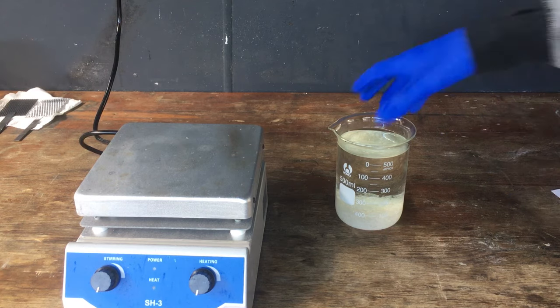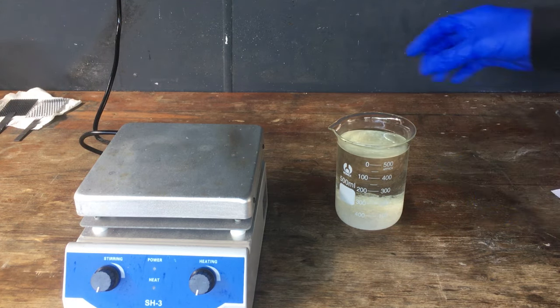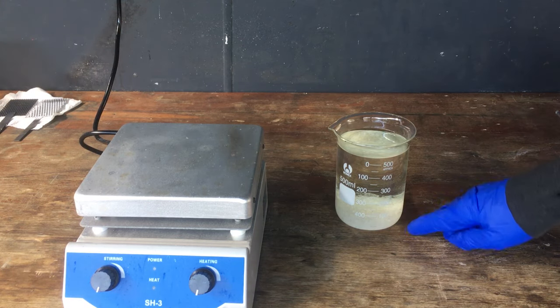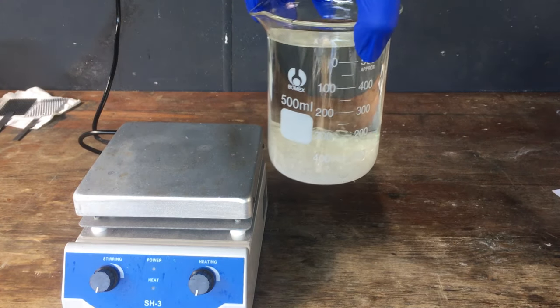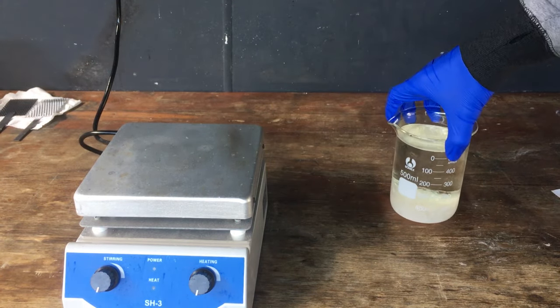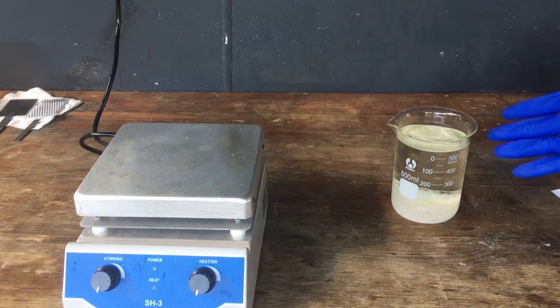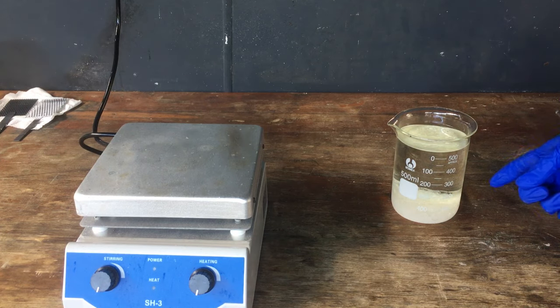Now after finishing running the cell, we are left with approximately 550 milliliters total of very concentrated sodium chlorate solution. In fact, as you can see down the bottom here, a whole bunch of sodium chlorate has crystallized out, which is very promising. Now we could probably just extract all of the chlorate that's already crystallized. It's probably pure enough for pretty much anything you're going to use it for, but we're going to take it a step further.